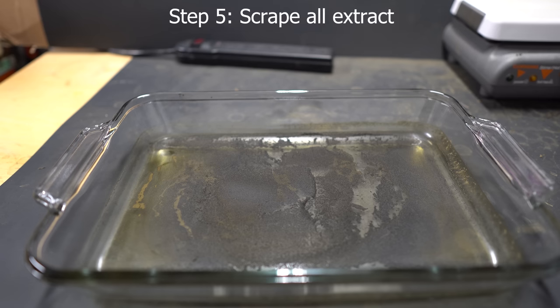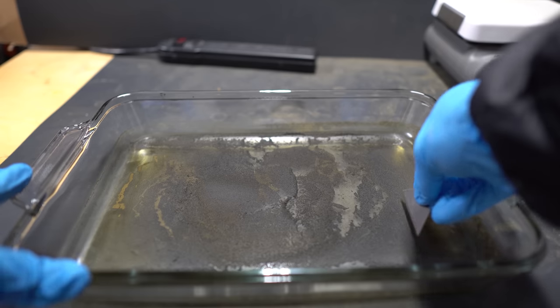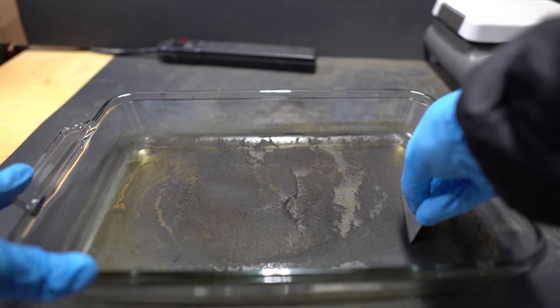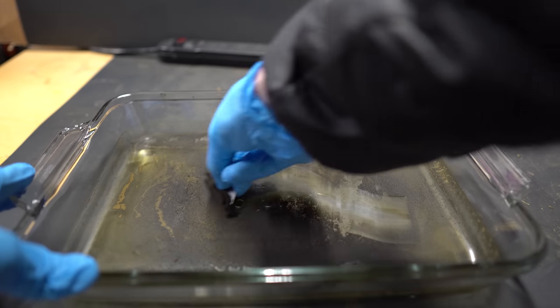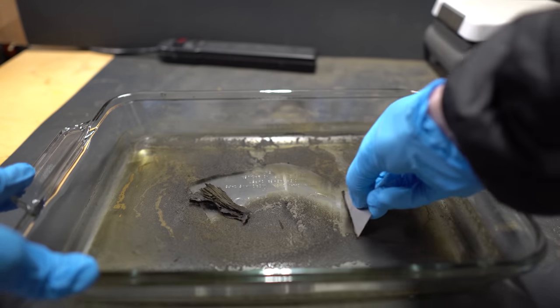I then let a fan evaporate all the acetone and it took about a couple hours. I now have to scrape up all of the extract with a razor blade. Even though I used very cold acetone, it still pulled a ton of waxes into the extract.